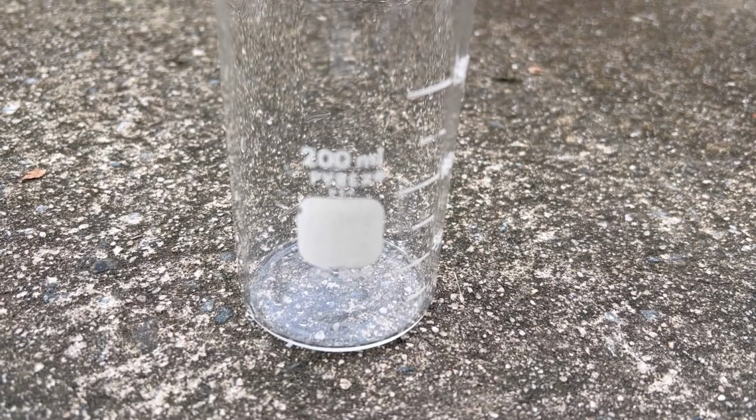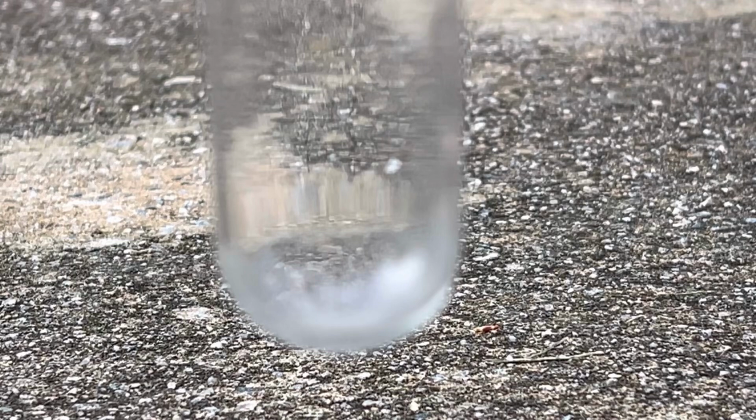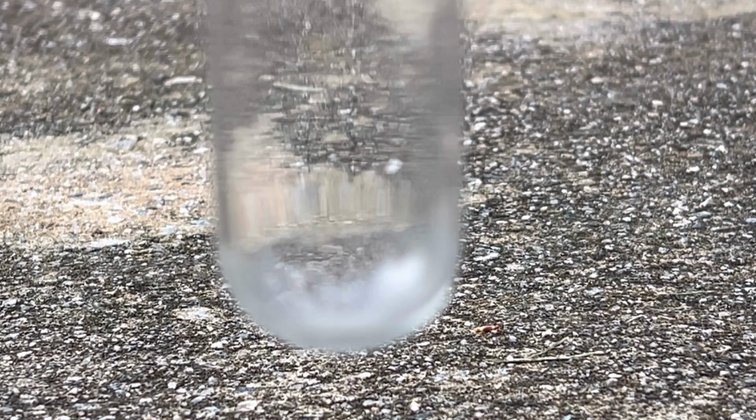Alright, so the next thing we're going to do is something called the thunderstorm in a beaker. Alright, to do the thunderstorm I'm actually going to do it in a test tube instead of a beaker. But first, what you want to do is add some isopropyl alcohol, but actually most people use ethanol. But I think, if I'm not wrong, isopropyl alcohol should also do the job.